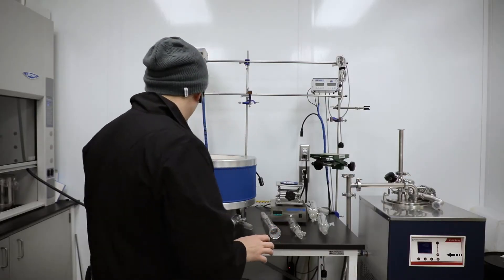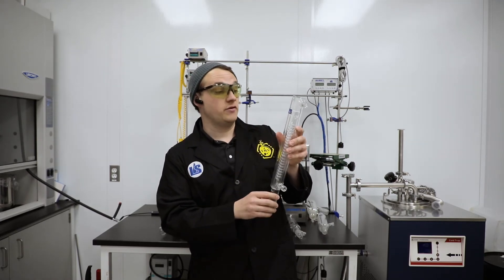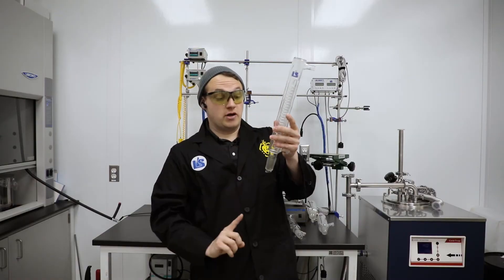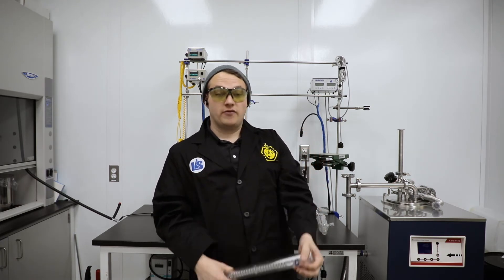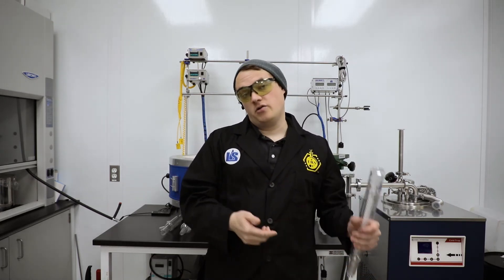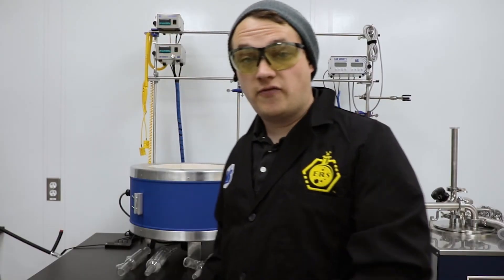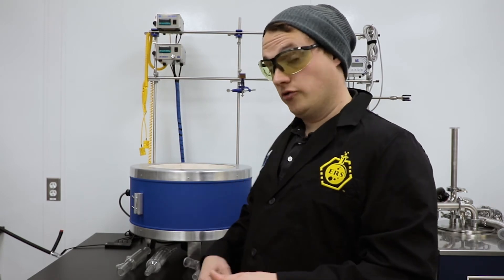This condenser is a Graham style condenser. This one's completely different than the rest because rather than the vapor traveling around the coil, it's actually traveling through the coil. These are great for terpene distillation — things that are very low boiling point where you need a lot of surface area. Using the Graham style also reduces the amount of cooling you need because there's so much surface area that you don't need to get it as cold. It's great for using our steam distillation kits. You could also use this to capture terpenes from crude oil if you wanted to.